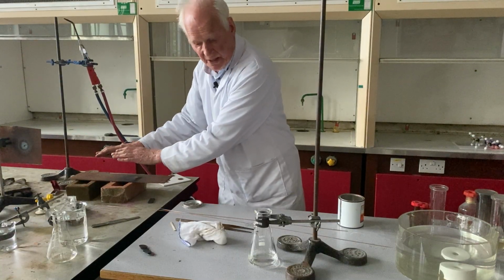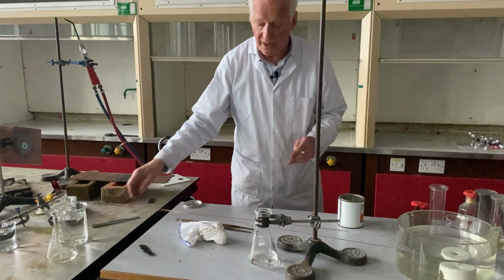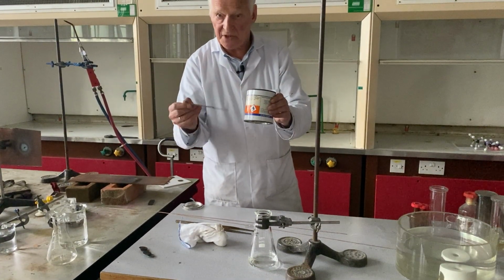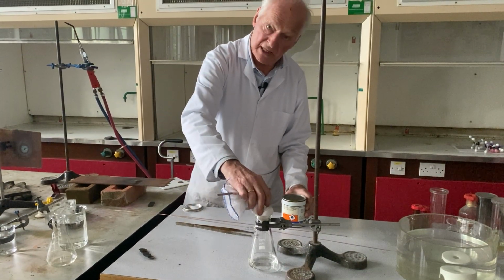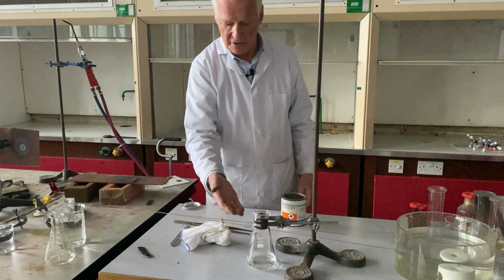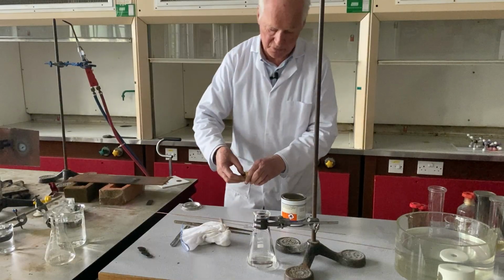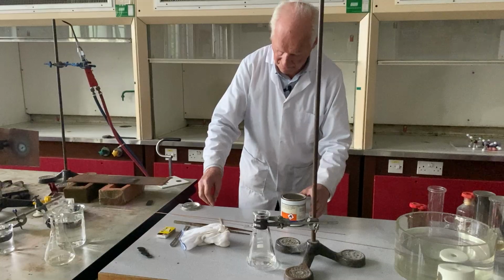This flame here is still very hot, by the way. So I'm going to apply a lighted splint there once I've added my 2 pieces. So this will be the procedure. I have some calcium carbide in my tin here. I'm going to place 2 pieces of calcium carbide in there. I shall immediately plug the hole with my cloth, and then I shall apply a light to the tube coming out of the Buchner flask which I have here. I've got some matches here just in case the splint doesn't manage to carry the flame.